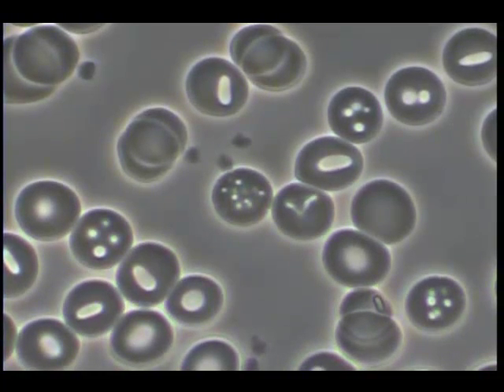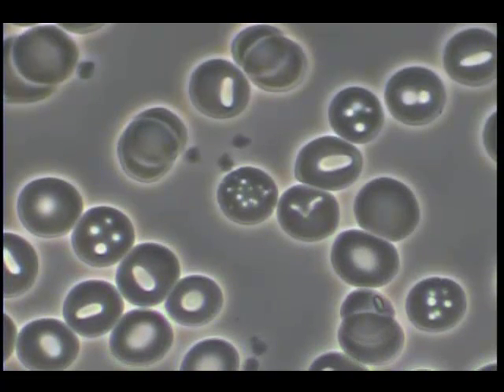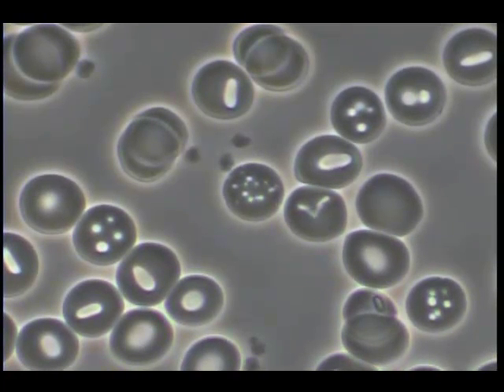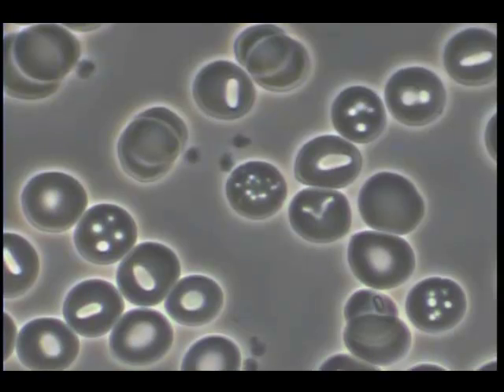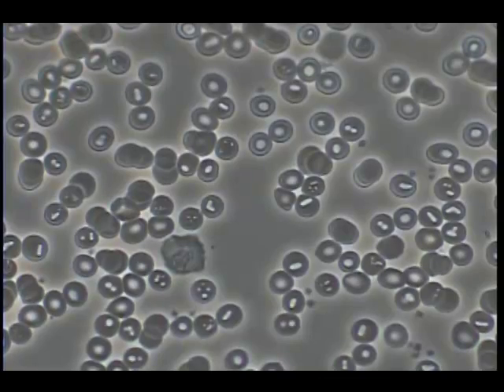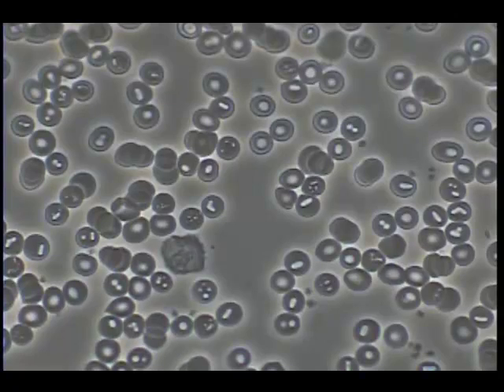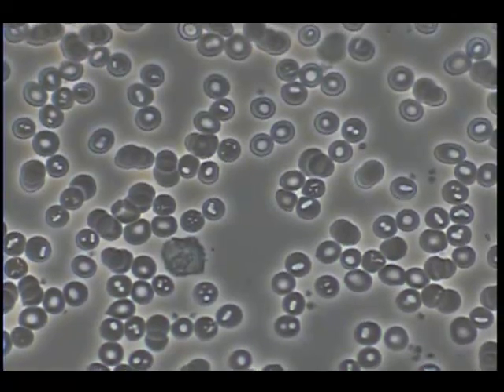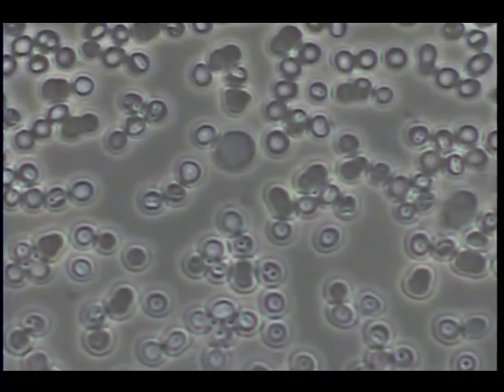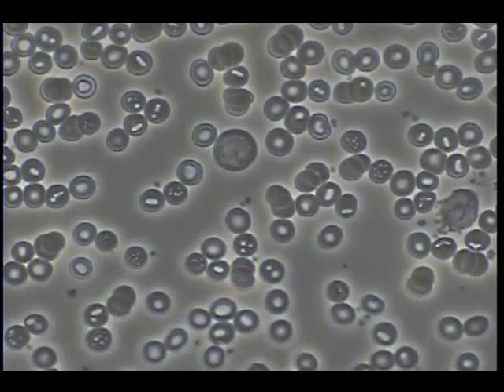The common observation that the erythrocytes are generally parasitized or presenting surface artifacts that suggest parasitization indicates a likely inhibition in the ability to carry oxygen. So systemic hypoxia is likely a cofactor in the condition. Also note the percentage of what appear to be target cells with collapsed cell membranes, which likely further contributes to the tendency for hypoxia, leading to fatigue as well as healing challenges.